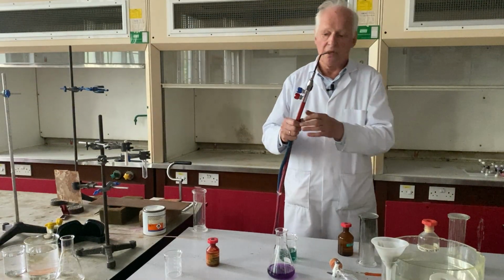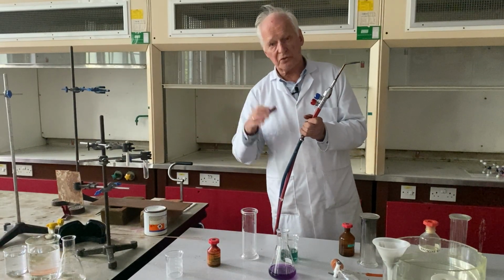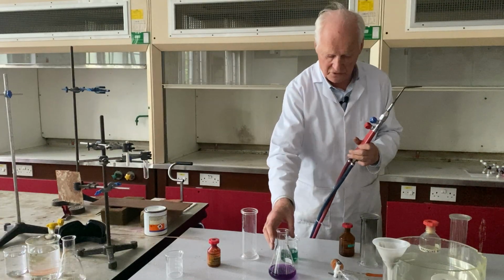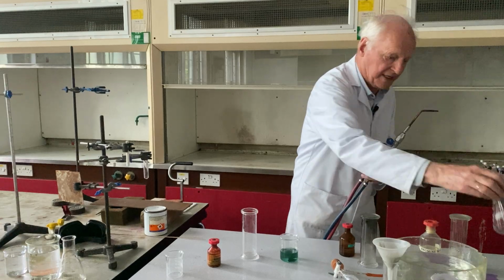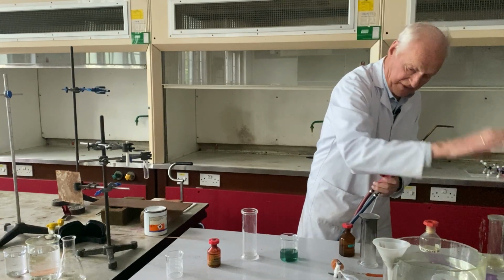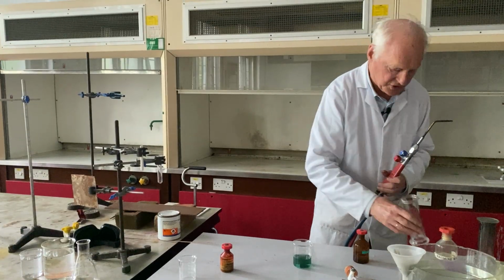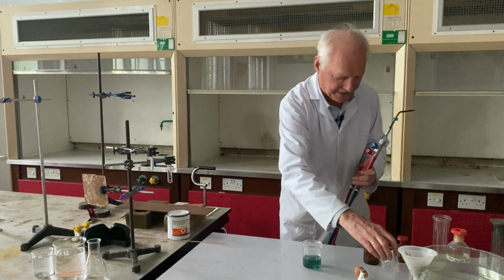I'm now going to ignite my burners here, and then I'm going to show you some remarkable effects of this very, very hot flame. However, before, whoopsie-daisy, just as you see, careless, I have spoken, but that's of no concern, these things happen. I'm going to now focus onto the equipment which I have on my large retort stand here.